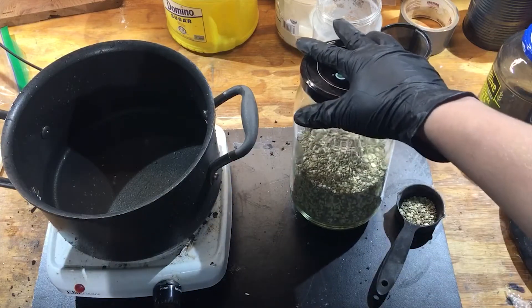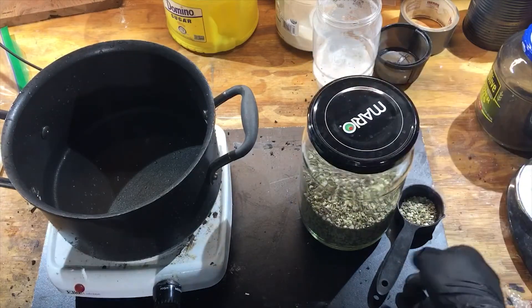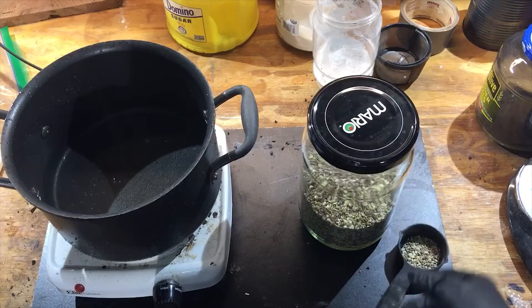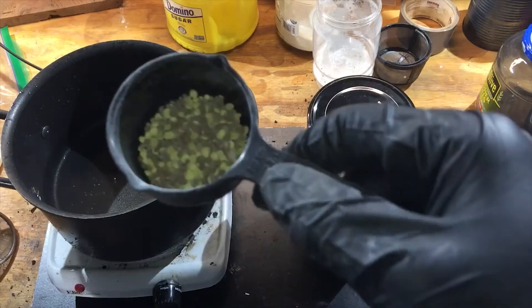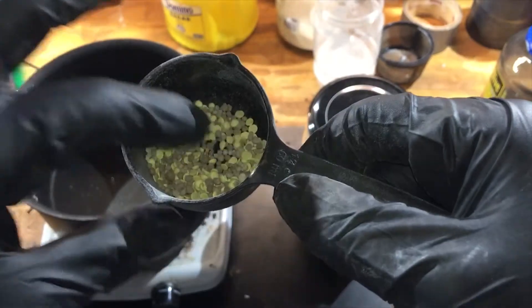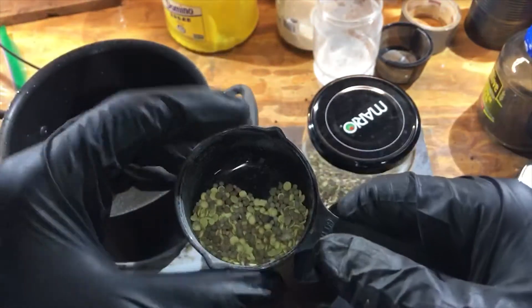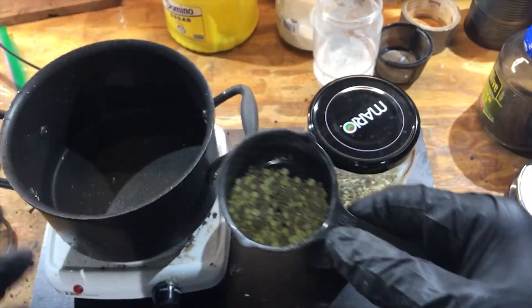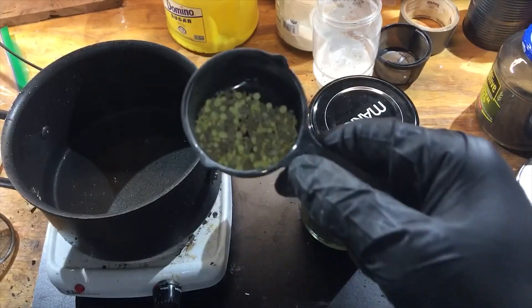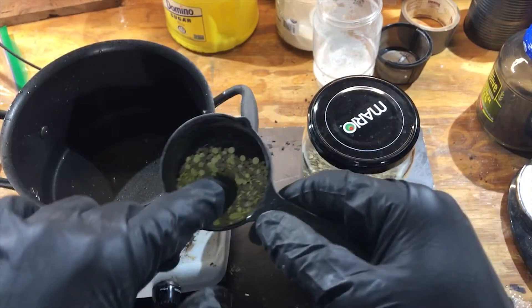But anyway, I'm gonna be taking this and getting out the sulfur — hopefully somewhat pure sulfur — so I can use it in my homemade rocket fuel. The sulfur I bought consists of these pellets here, and these yellow pellets are sulfur, and the gray and brown pellets are impurities that I don't want.